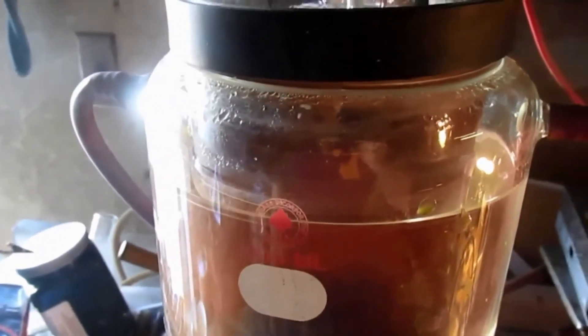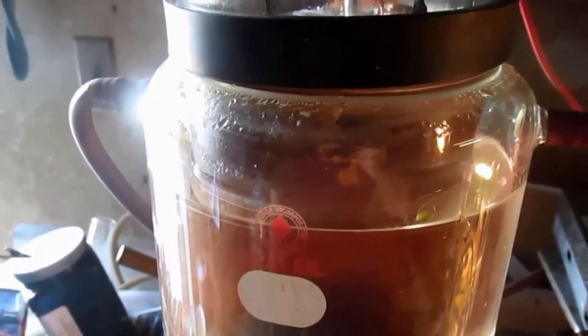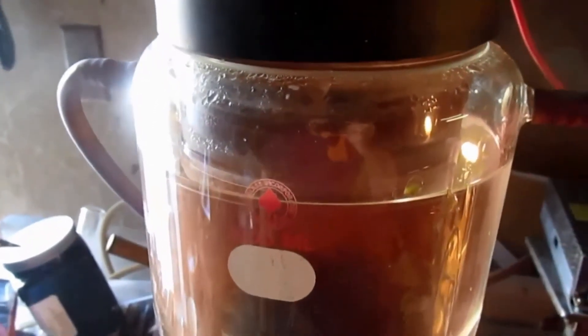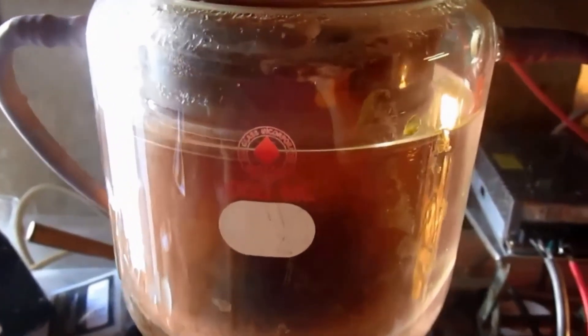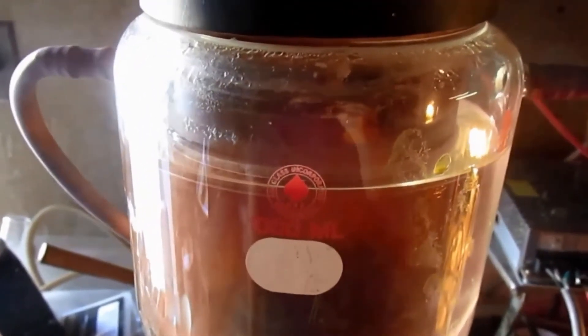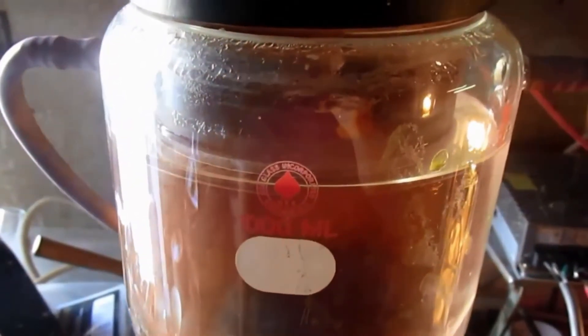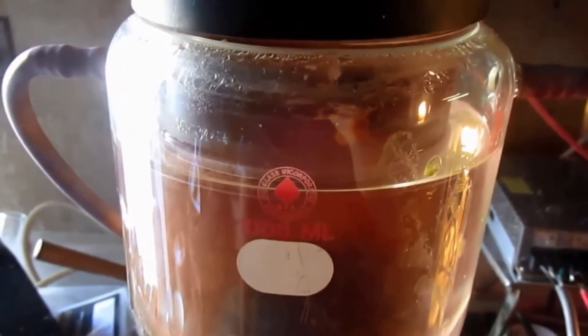We're going to let it run for a little longer just to ensure complete conversion. Oh, and one thing I forgot to mention: this cooling jacket on the outside—a continuous stream of water is not run through it, and it's only there to act as a buffer.